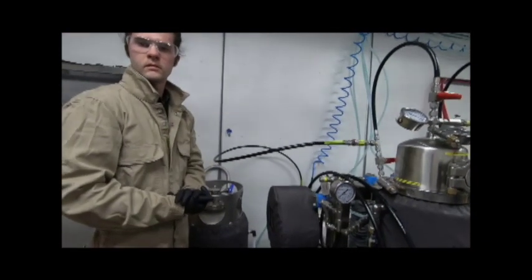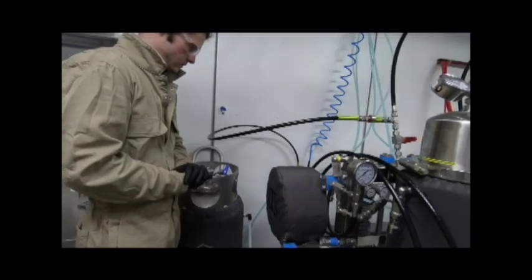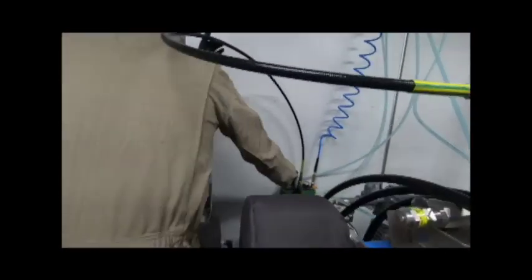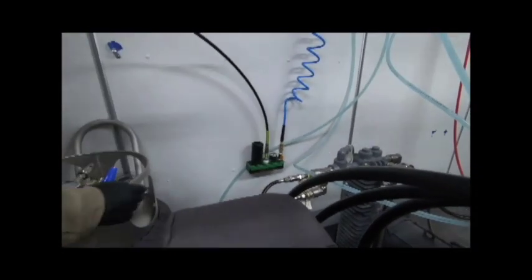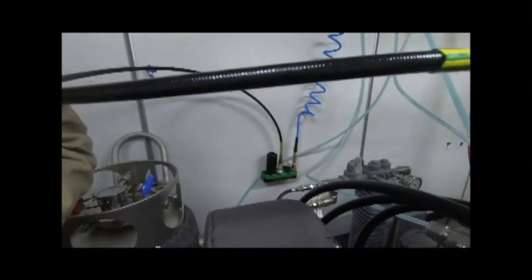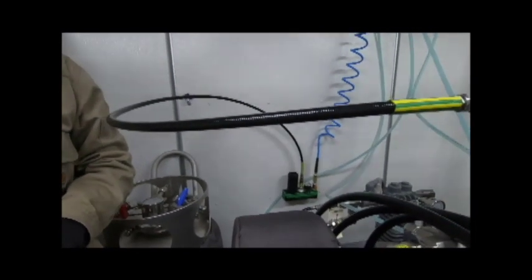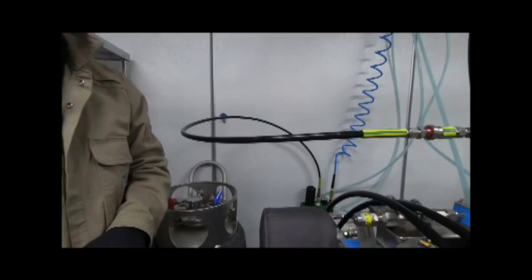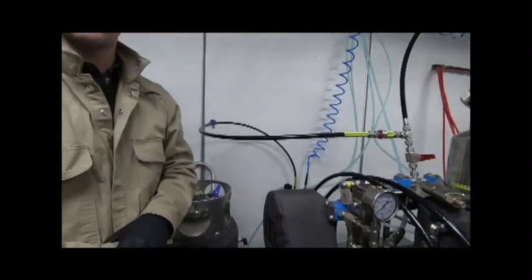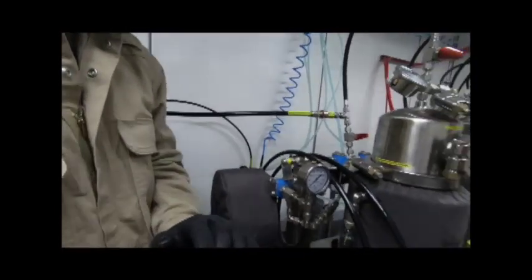Number four, open yellow valve on air tool. Number five, in line sequential order open all red, green, yellow, and black valves.